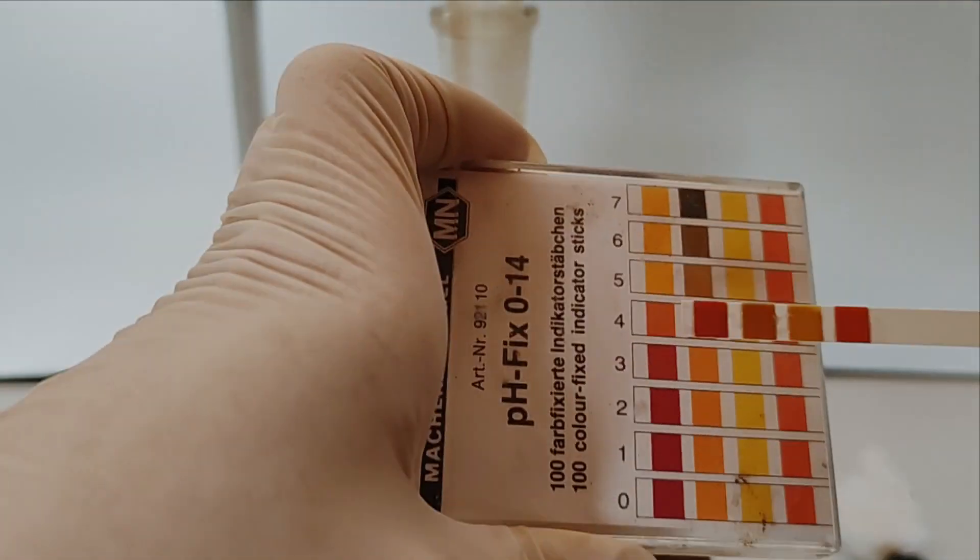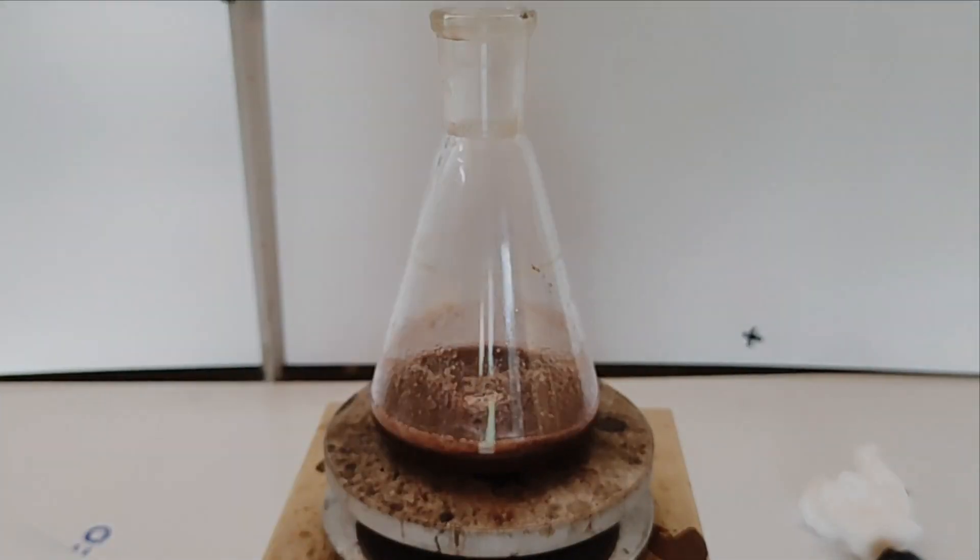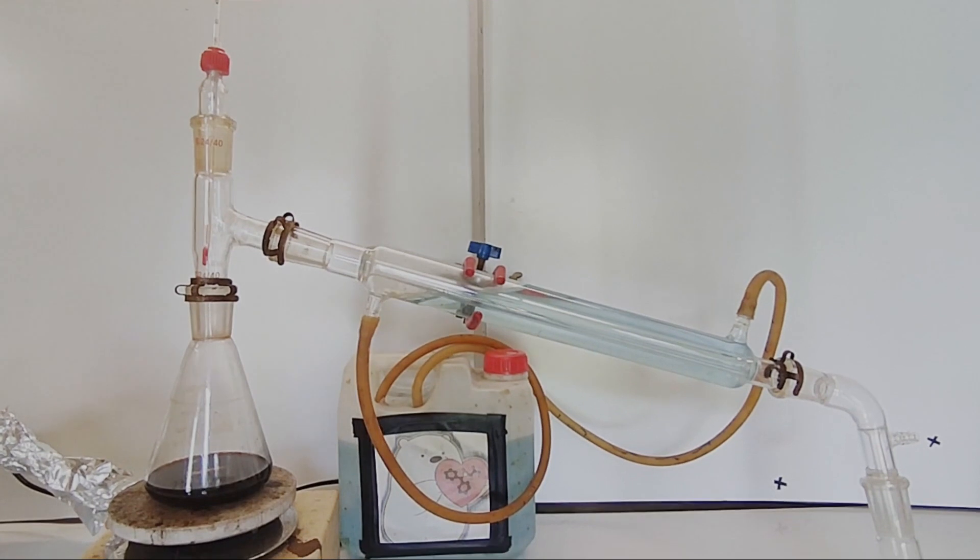We now have a dark brown mixture of our product, remaining starting materials, and various side products formed in the reaction. To get out our desired product, we will have to distill it out.